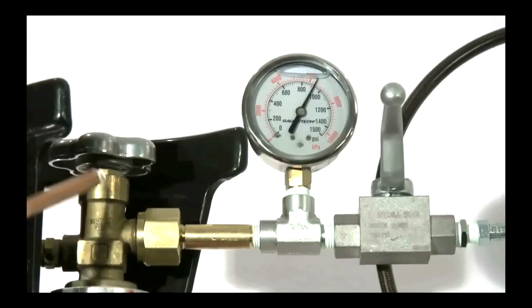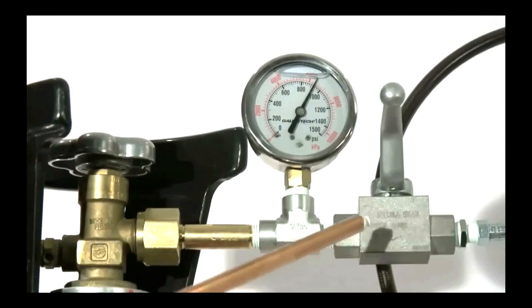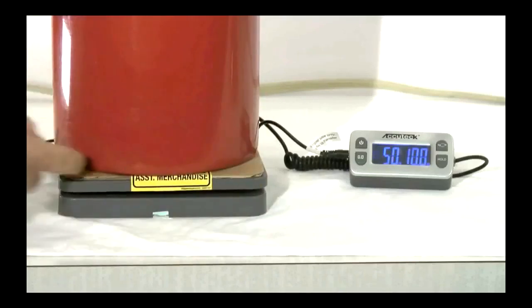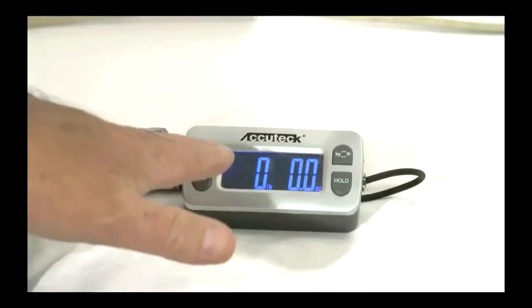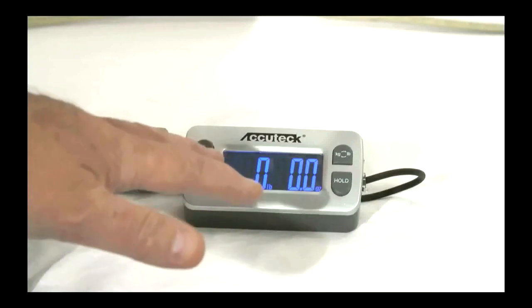This is the supply tank rotary valve and the isolation valve. The supply tank is positioned on the scale and centered. The weight can be seen. I will zero the scale in advance of the CO2 loading.